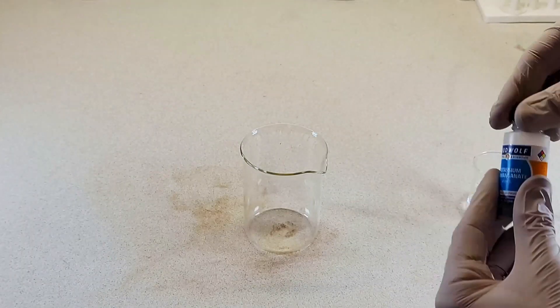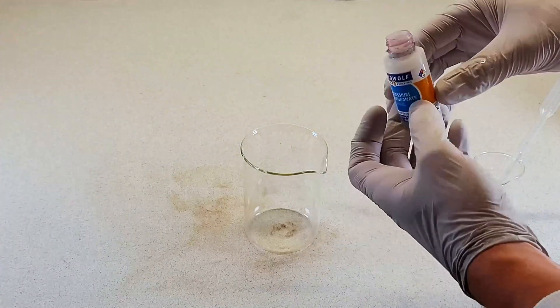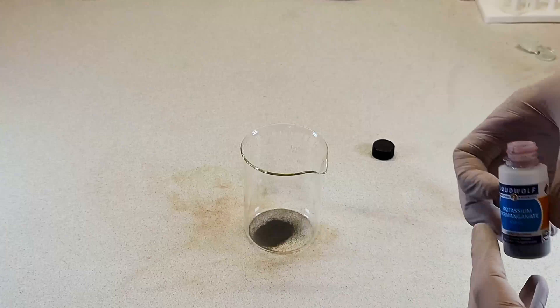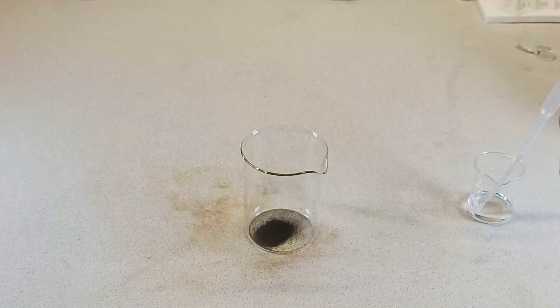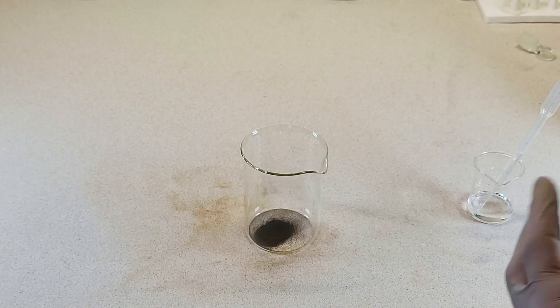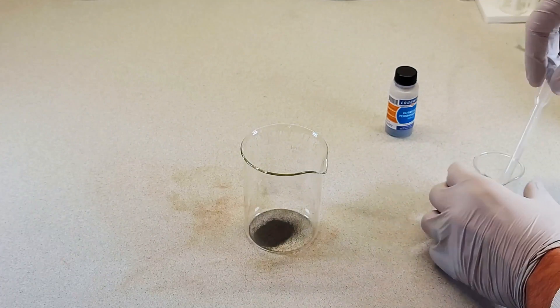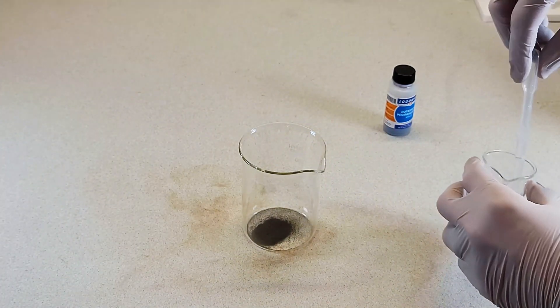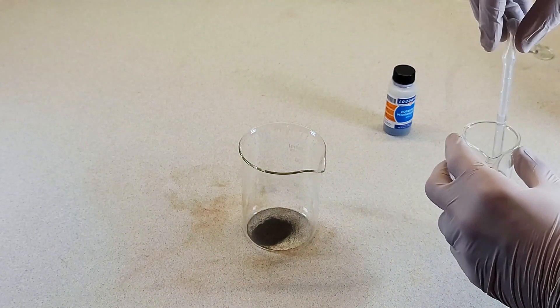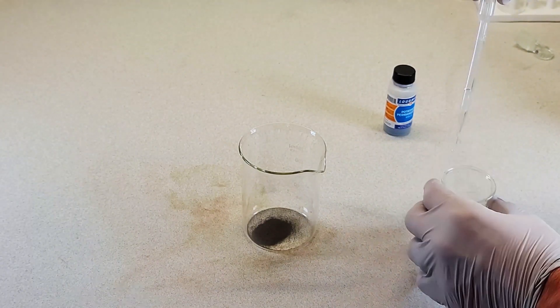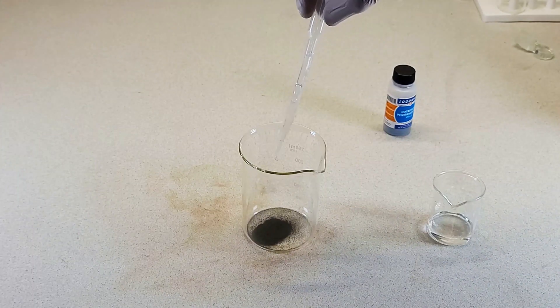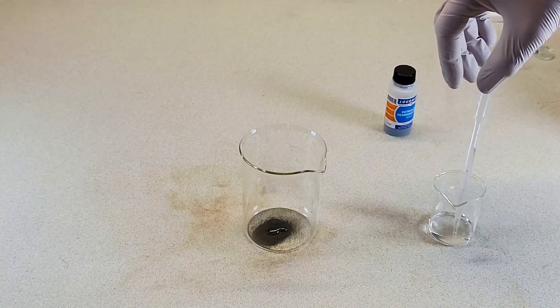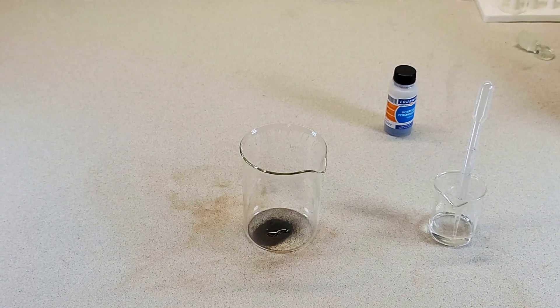So for this reaction, once again we take our potassium permanganate, and we'll just make a little pile down there. Now in this beaker I've added some of the vegetable glycerin that I had mentioned. And it really is as simple as adding a little bit on top. We'll just wait for a second.